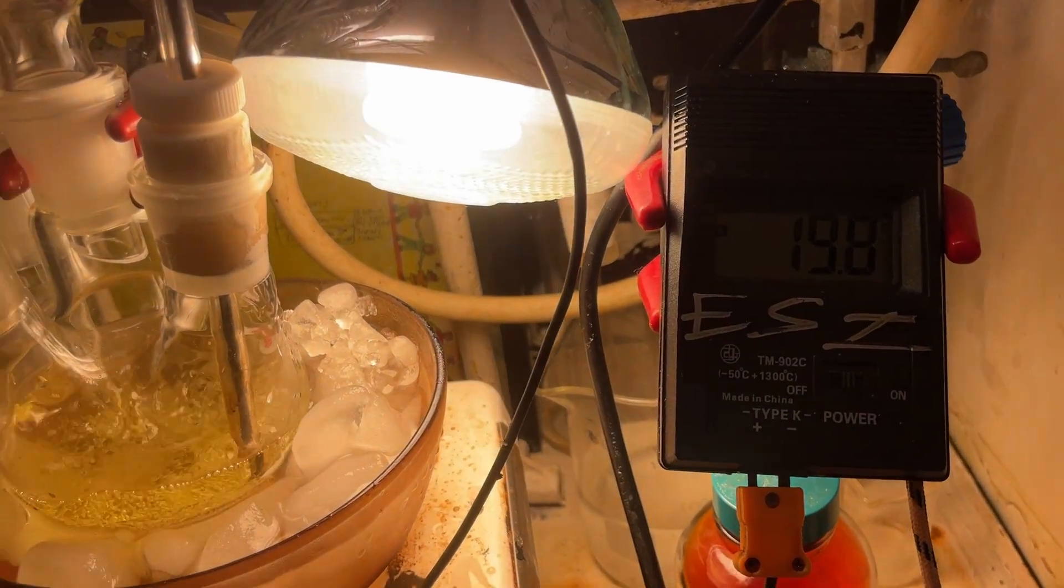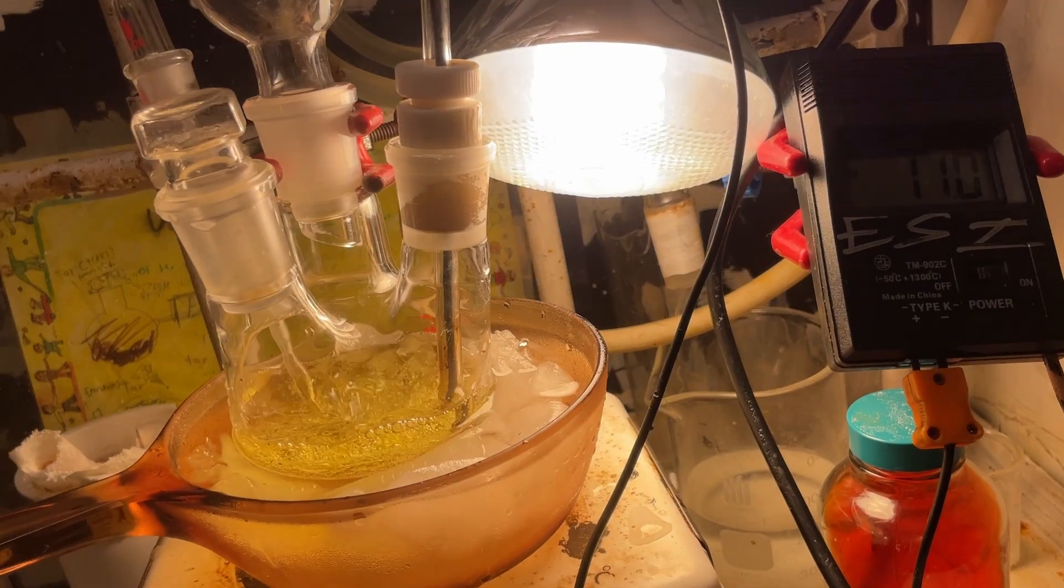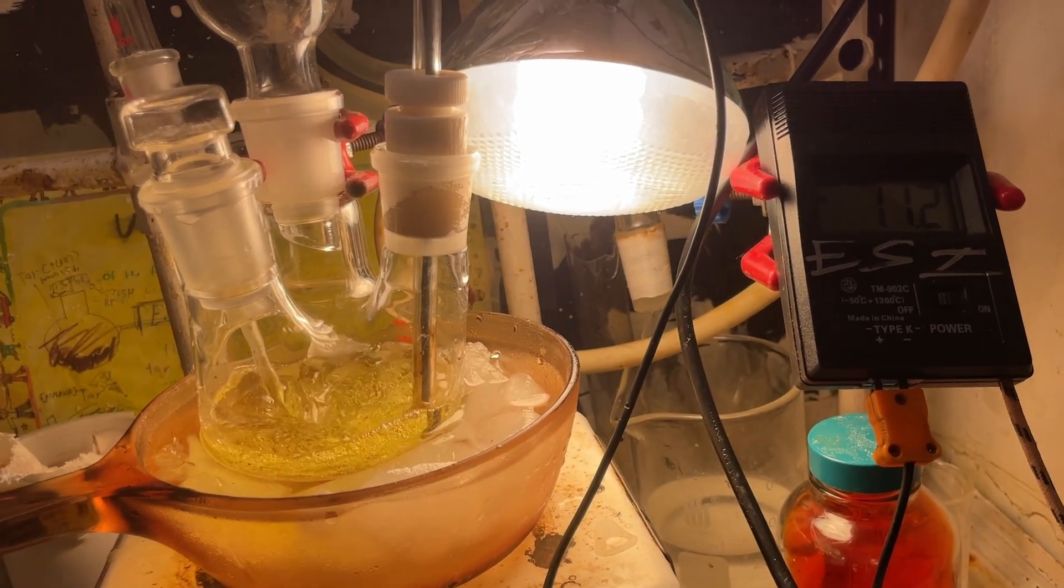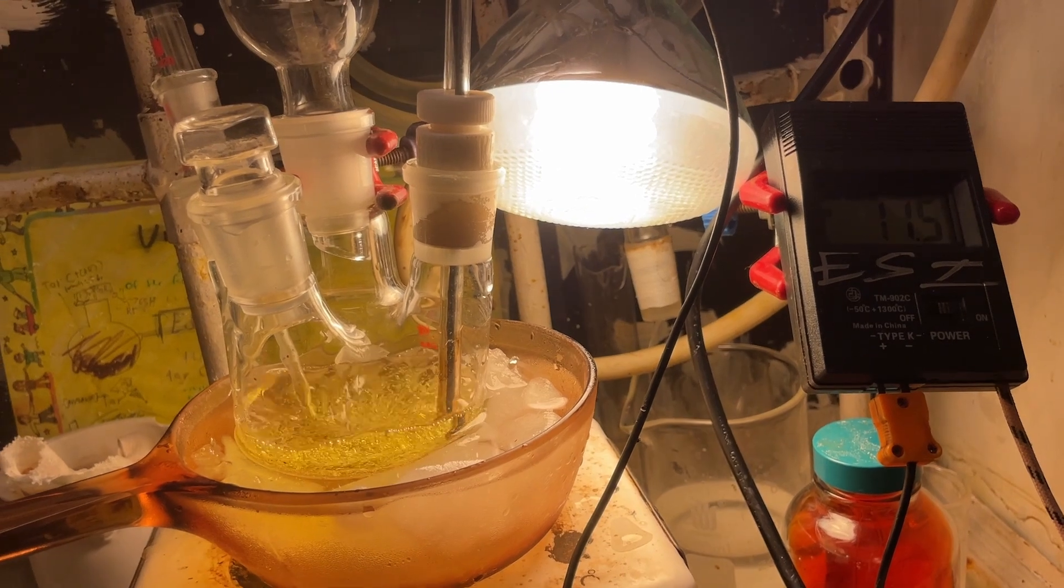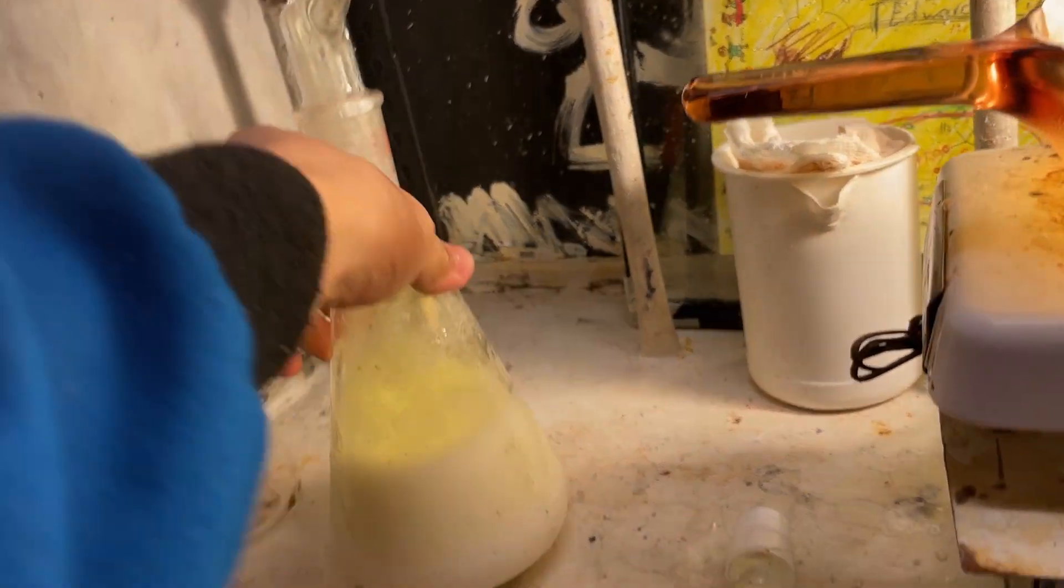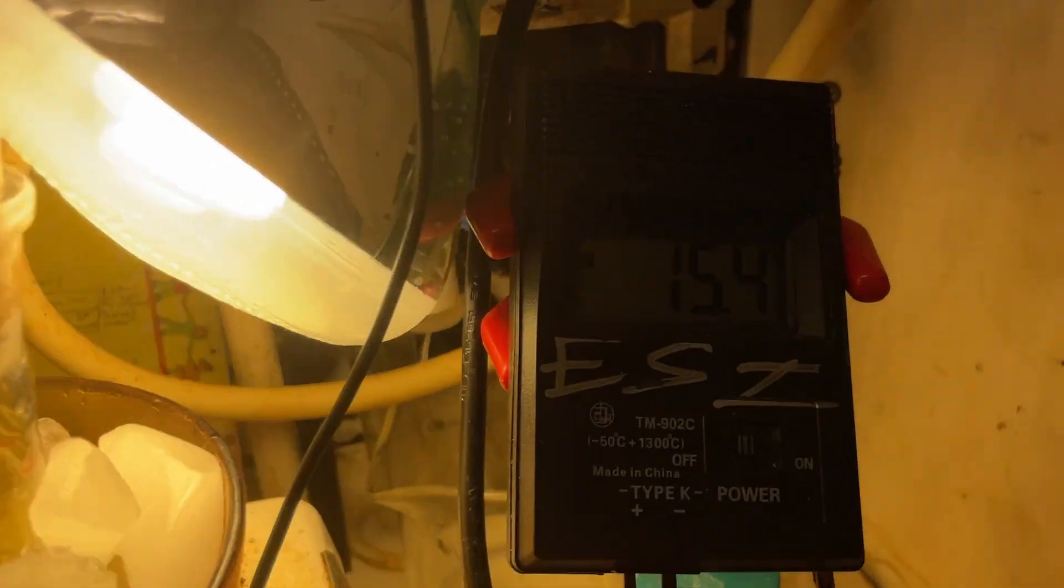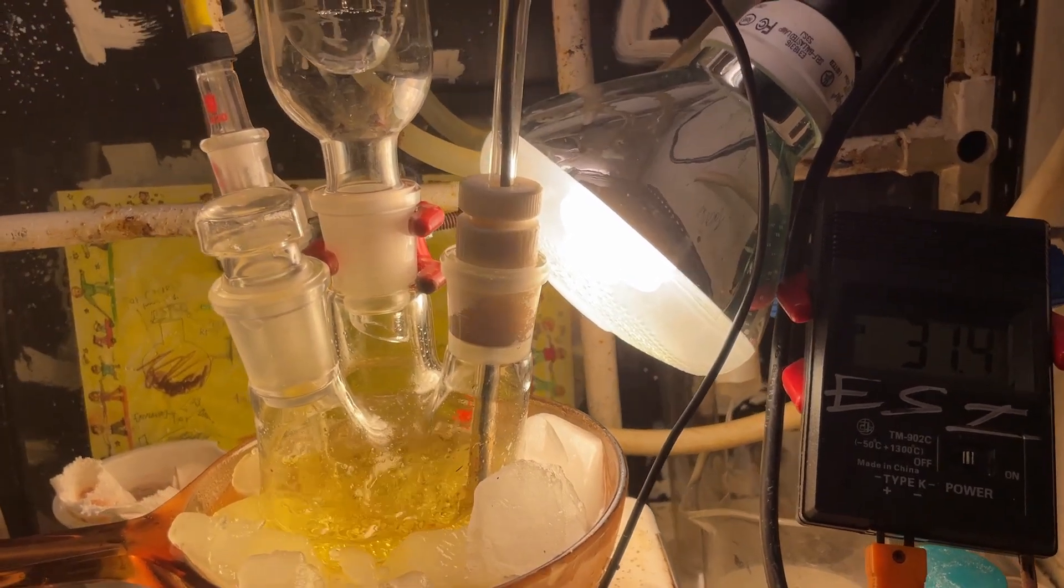Okay, the reaction's at approximately 20 degrees Celsius. I'm going to let this cool down a bit before I need more chlorine. Okay, let's hope I don't explode.